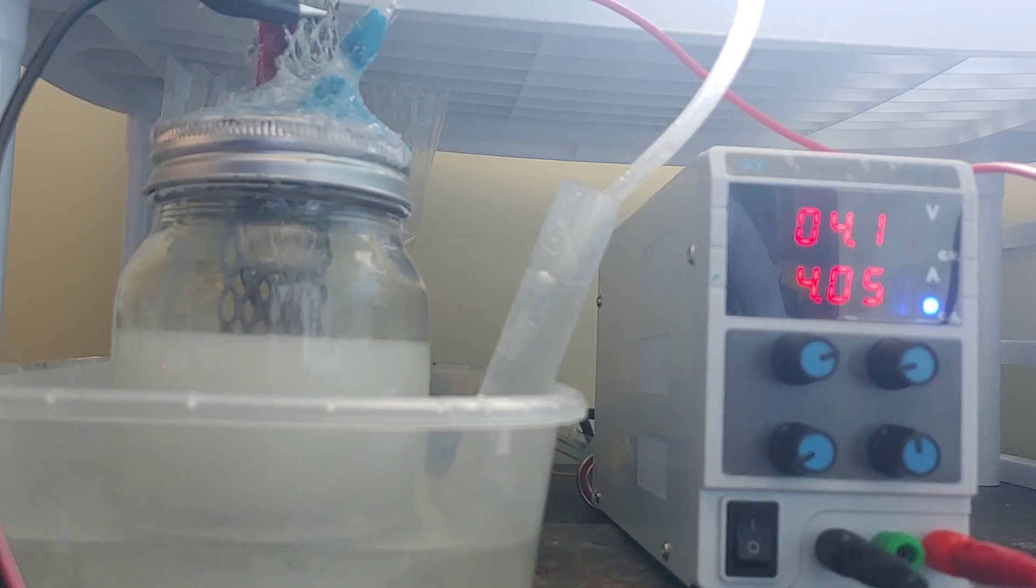Hi there! Today we're gonna be doing a video about a chlorate cell. So, I made a little chlorate cell. It's pretty damn efficient, if I do say so myself.